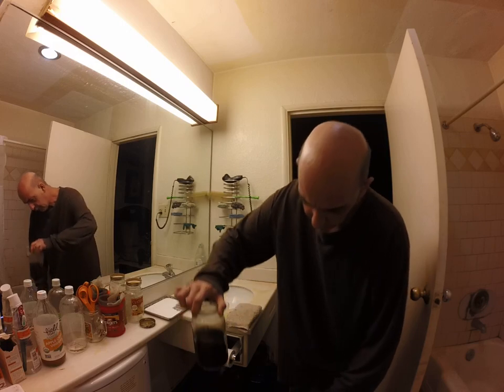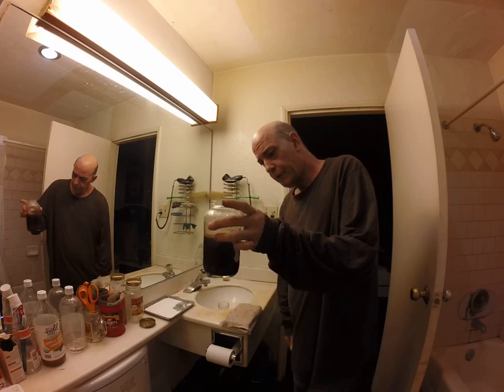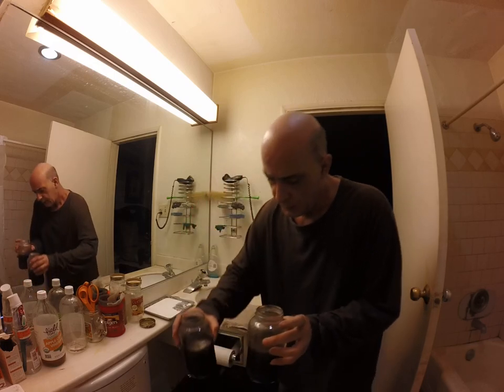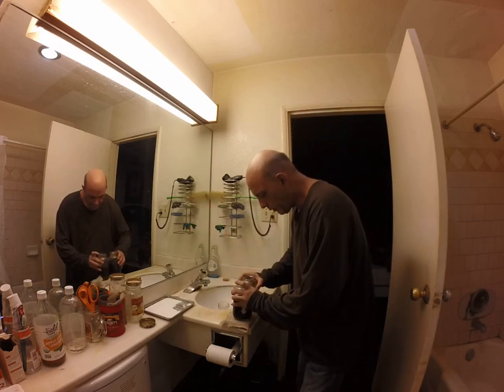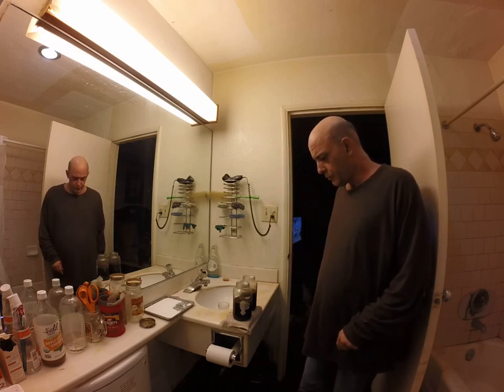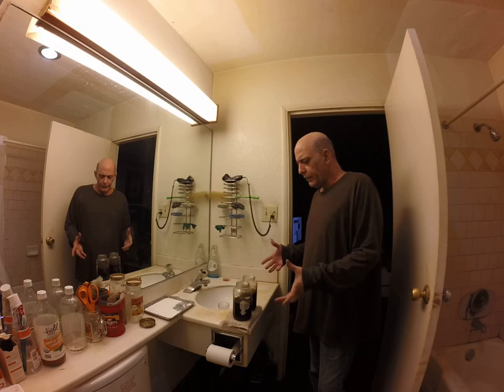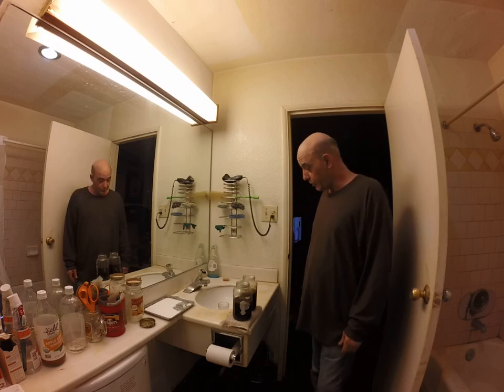What I have here is two jars of Harmala acetate. This started out as about four liters of water and about 250 grams of raw Syrian rue seed. Cooked it down, filtered it several times and reduced the four liters down to what we have here — about a liter and a half, if that much.